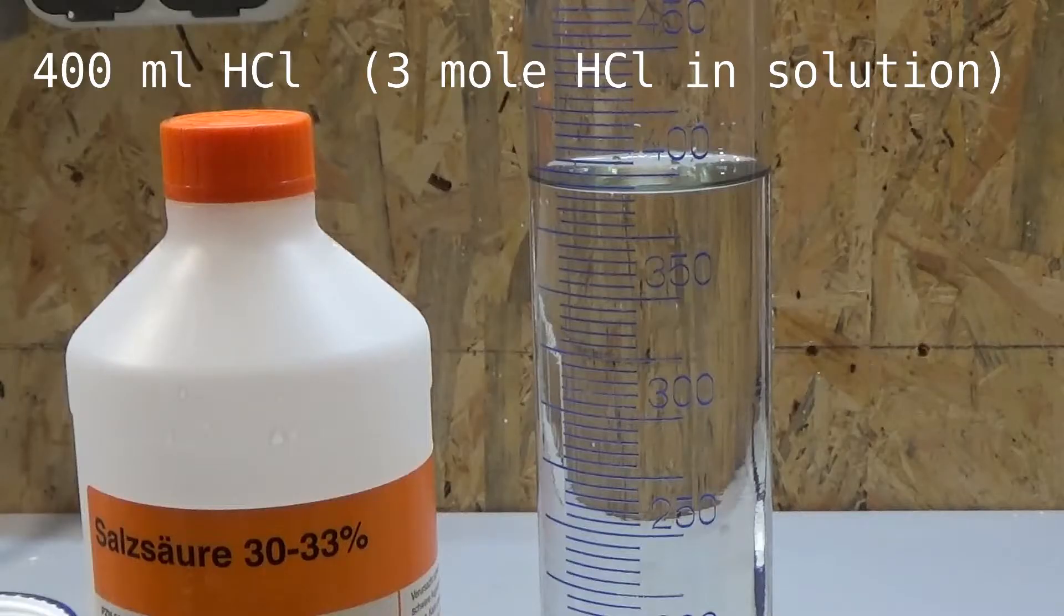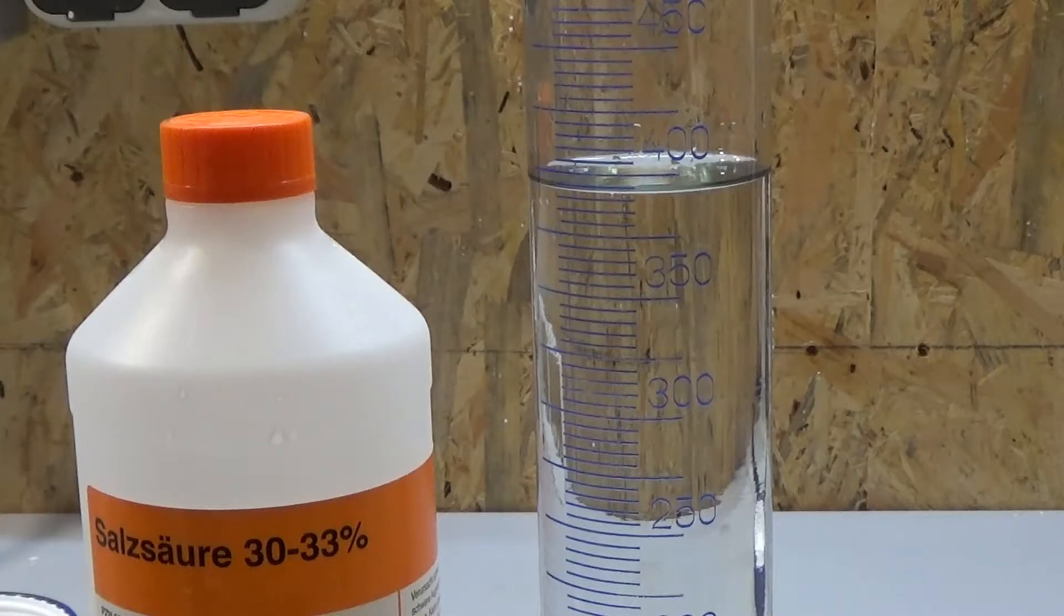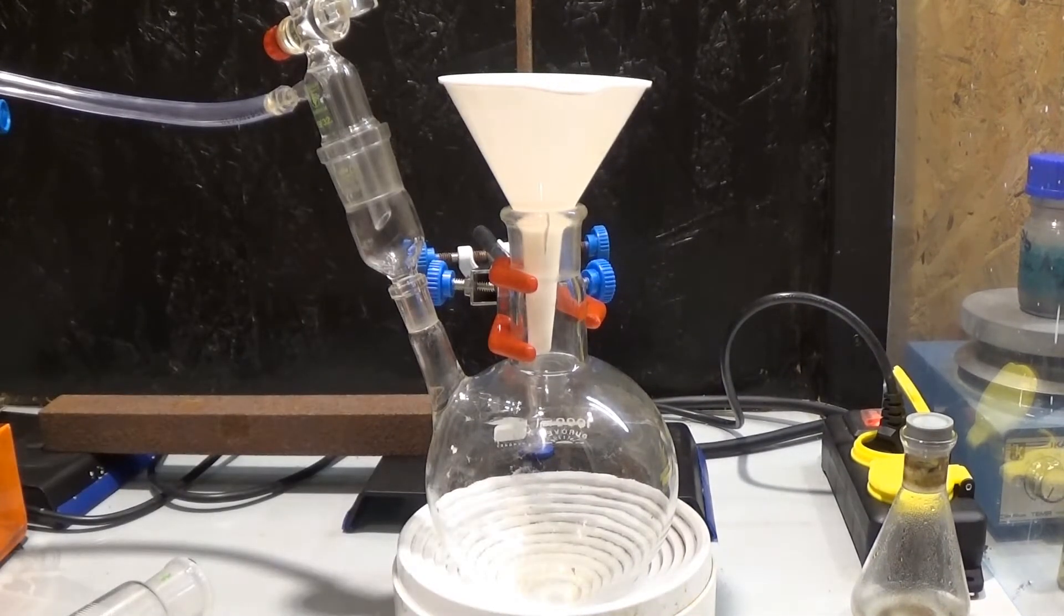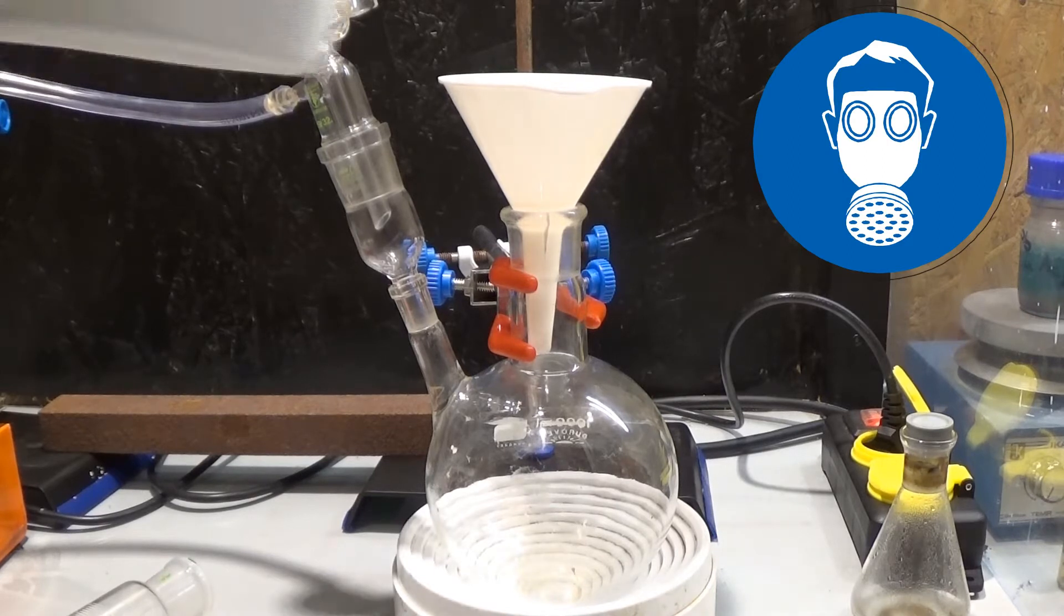After this I measured 400 ml of a 30-33% hydrochloric acid solution out. The TCCA is then transferred into a gas generator setup.